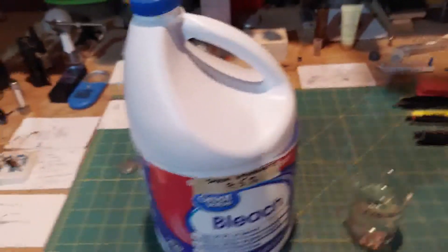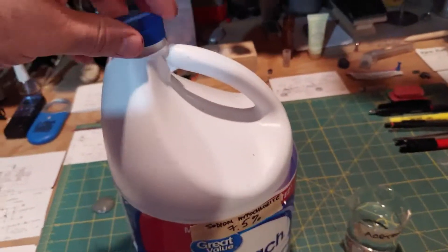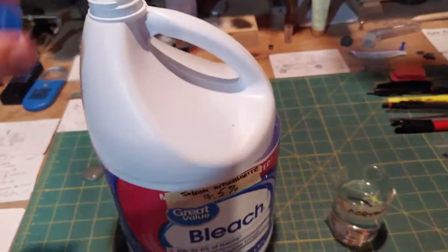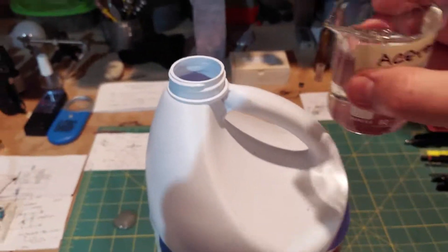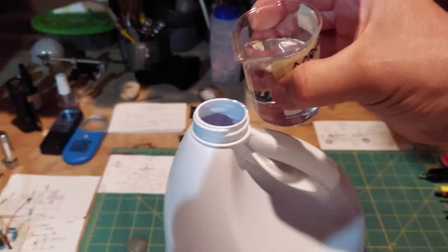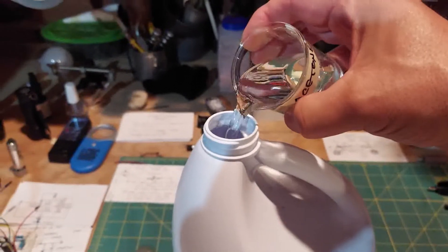So we're going to take our bleach right here. You have to remove a little bit of the bleach to start because you're going to add 100 milliliters of acetone to your bleach and it will start to react right away. So we're going to put that in there like that.